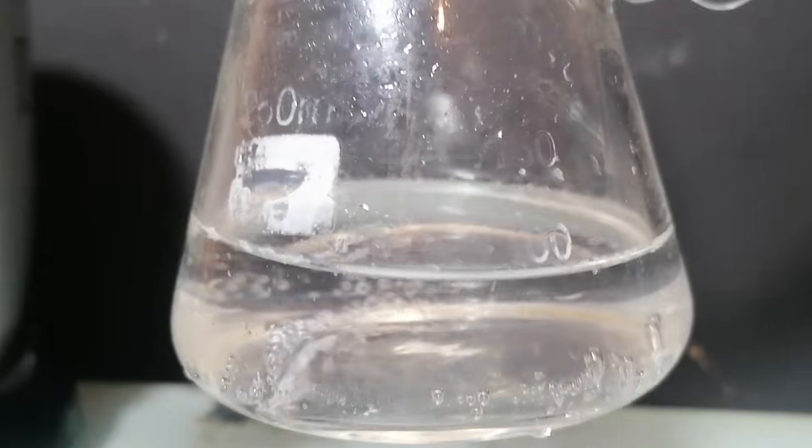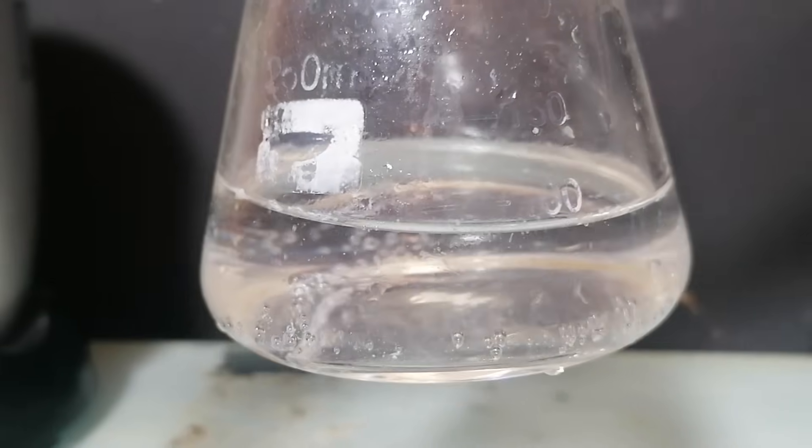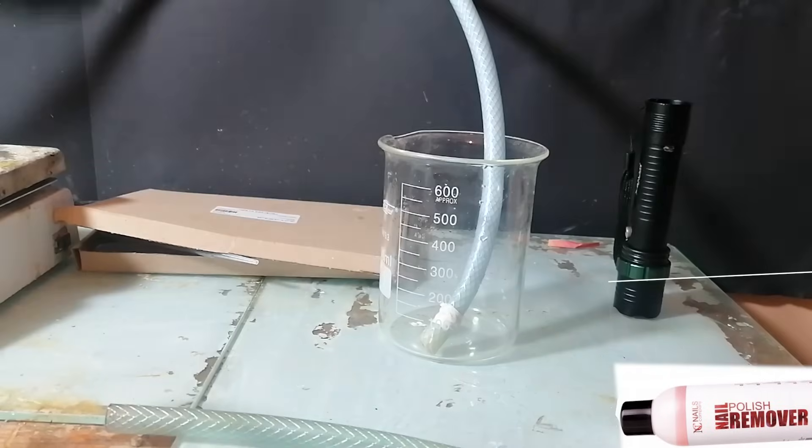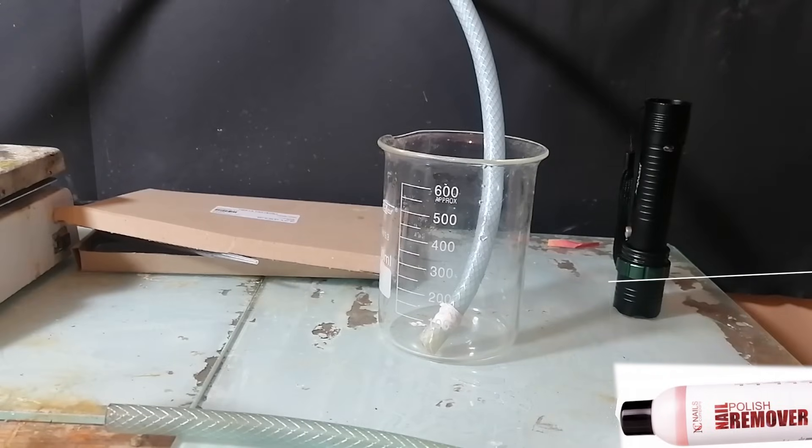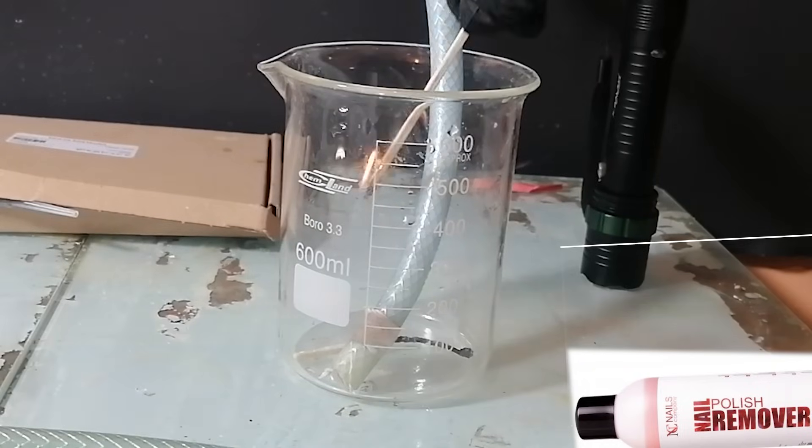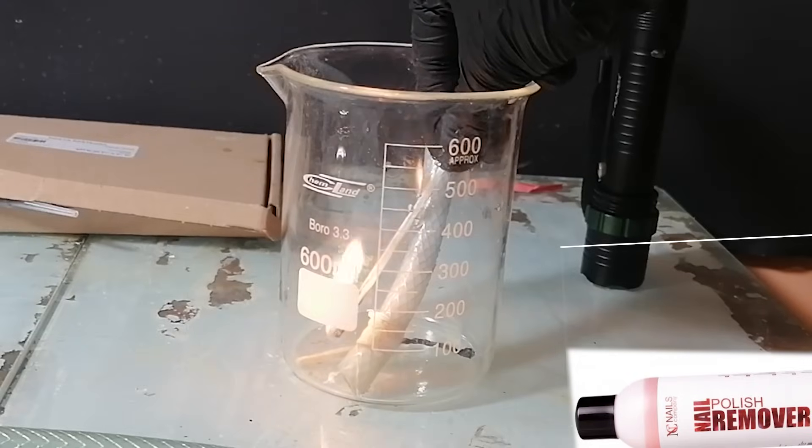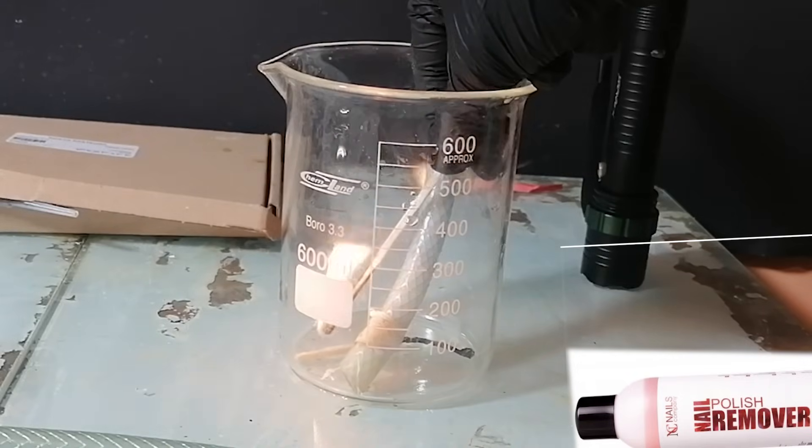I was actually quite surprised by the fact that it has some delayed fuse or something. Because laughing gas is heavier than air, it will slowly accumulate in the beaker. So anyway, here's me lighting a long match and see how it starts burning brighter and faster.